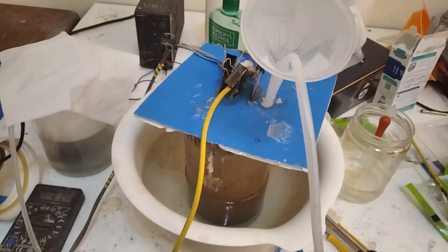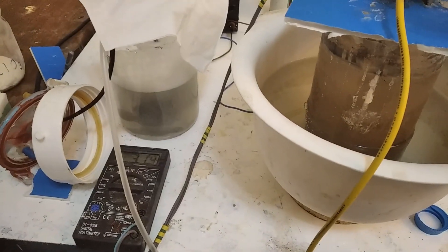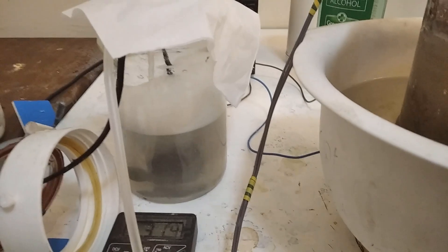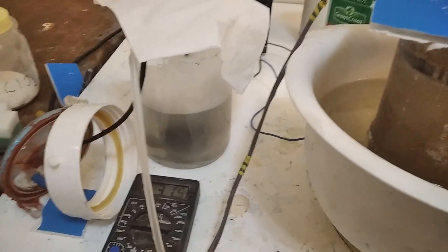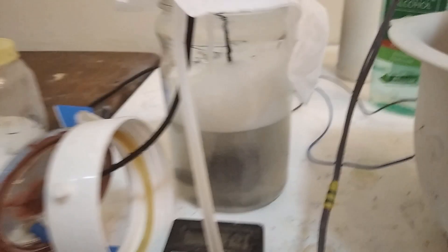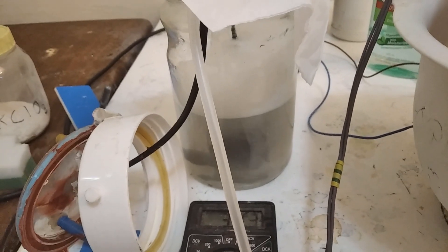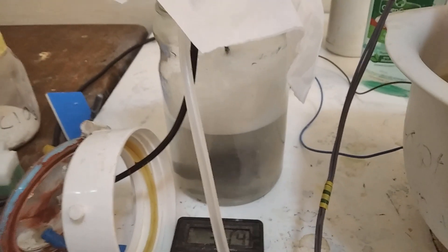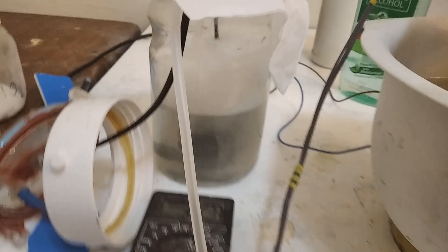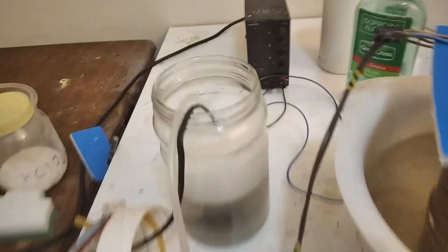I've attached the scrubber. The ozone is getting really bad, so that's a mixture of urea and a surfactant. The foam prevents mist from coming out. This demisting plus subsequent absorption into urea will destroy any ozone produced. That foam is very important because it increases the surface area of the solution. If you just do a regular scrubber, you're most likely just going to get some smoke still coming out. I put this thing on top because there was smoke coming out, but now I don't need it.